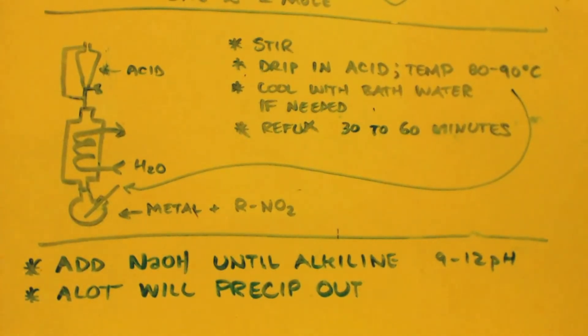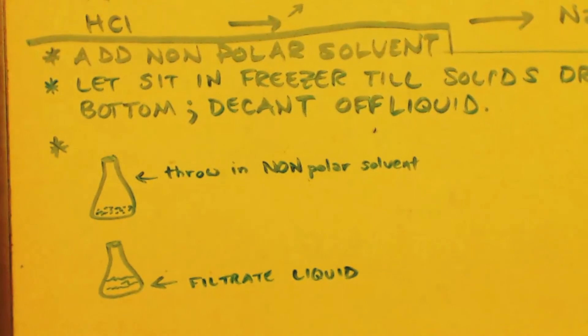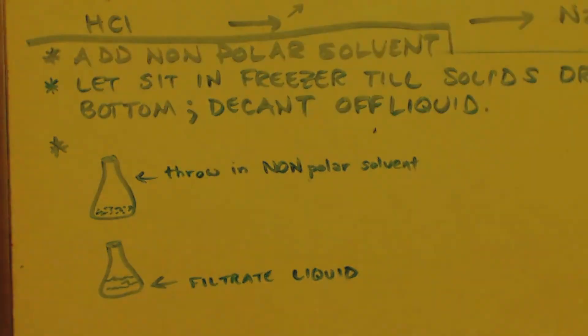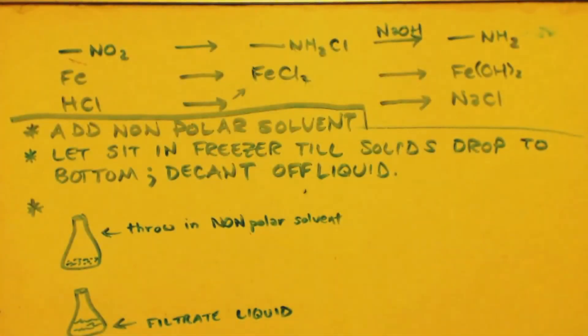Now, a lot of stuff is going to precip out. Now you're adding this sodium hydroxide little by little and then checking the pH until it gets to 9 to 12. If it's 14, that's good too. Whatever. Just so it's alkaline. You want to dissolve that sodium hydroxide in some water first. Dissolve it all up and then add it little bit by little bit.